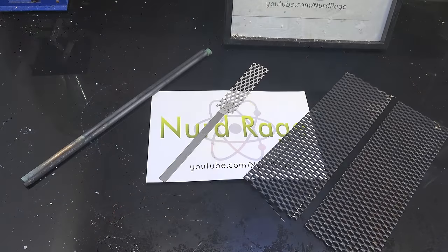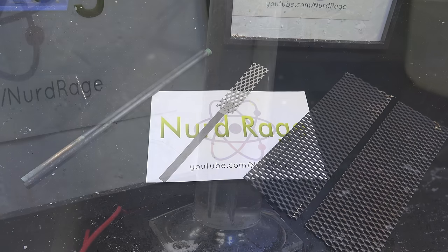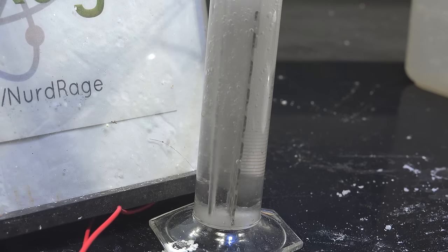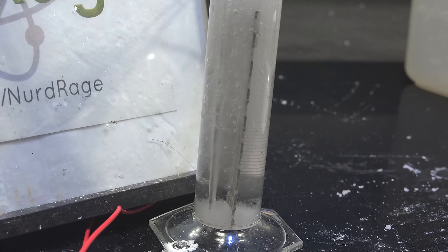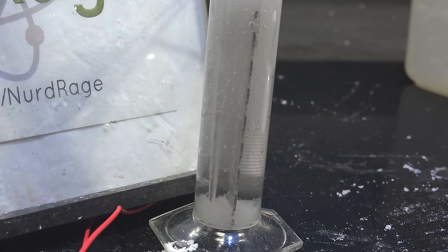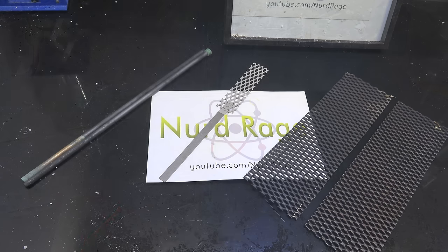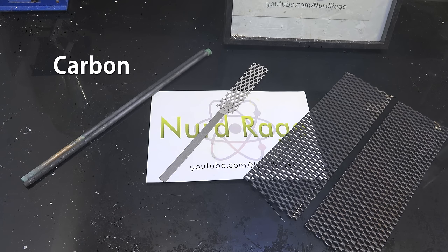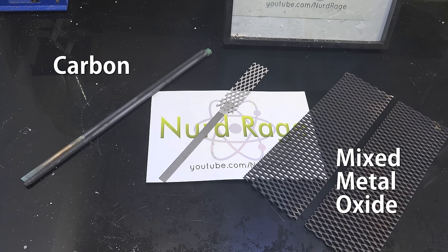Now before we start building, I need to go over the most important part of the potassium chlorate electrolysis cell, the anodes. These electrodes are where the oxidation is occurring and are notorious for getting destroyed in the highly corrosive conditions of a potassium chlorate cell. So you need anodes that resist corrosion. The three most common ones used by both amateurs and professionals are carbon, mixed metal oxide and platinum.